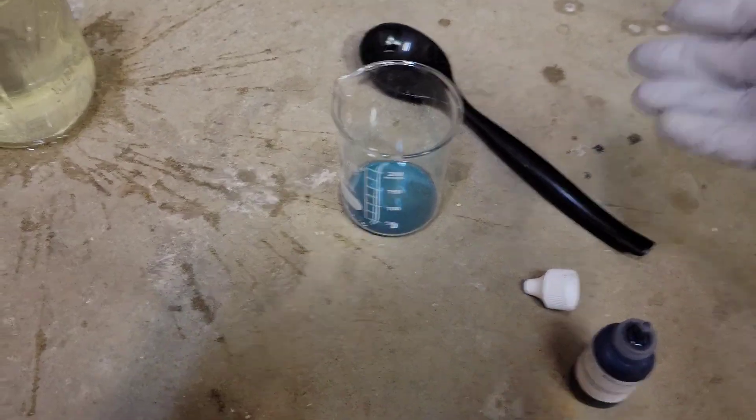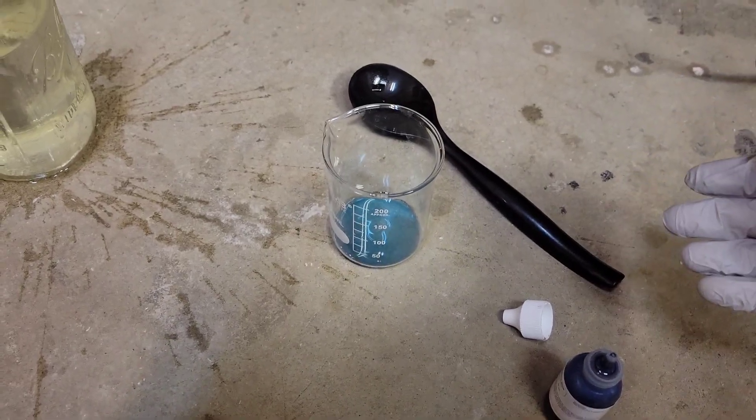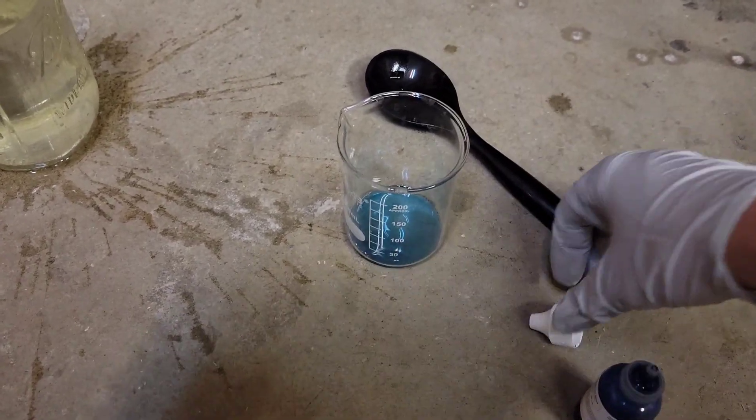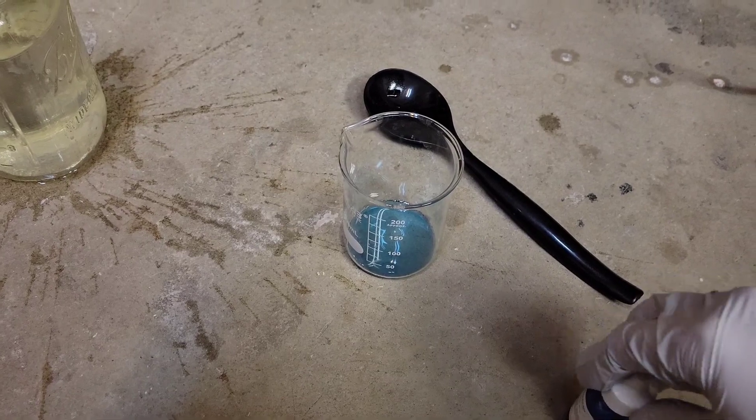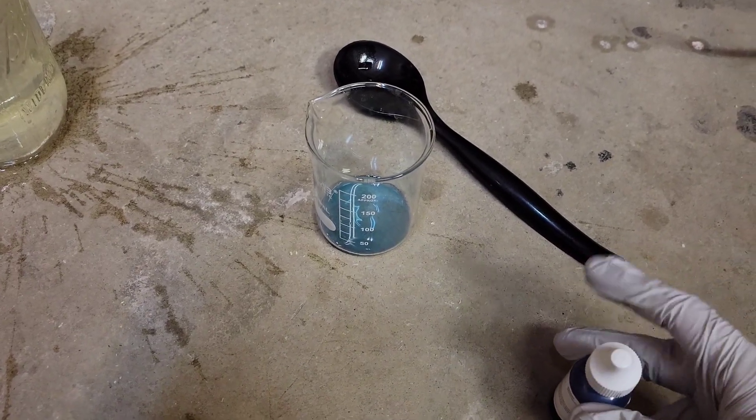So I just wanted to show you that test now, what it looks like when it fails, that way when we do actually pull perchlorate you'll notice a difference rather than being left in the dark if you decide to do this on your own.